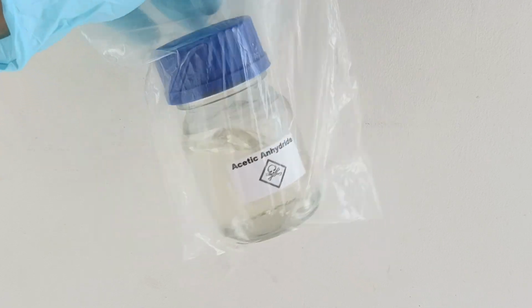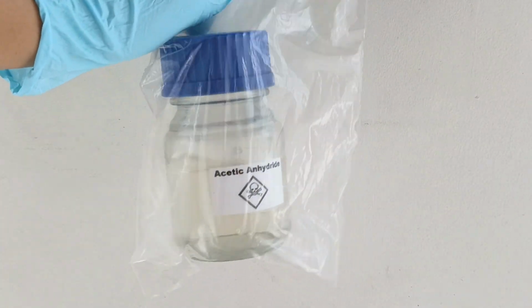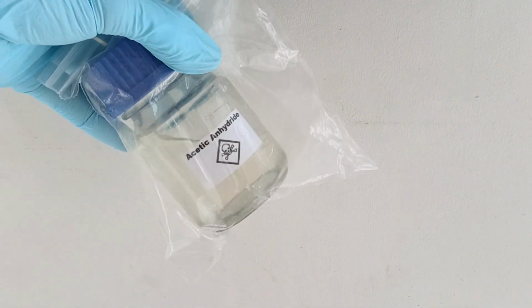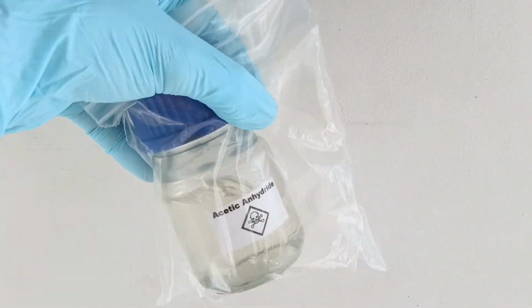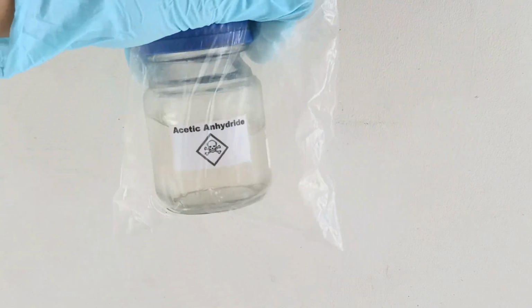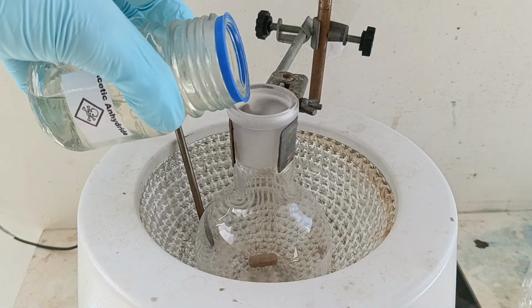I'm about to start filming part 3 of my aspirin to fluorescein synthesis. For it, I need some acetic anhydride. I made this acetic anhydride in a previous video. However, for synthesis, I require higher purity, so in this video, I'll be cleaning the old one up. It's quite easy, and all I have to do is a fractional distillation.